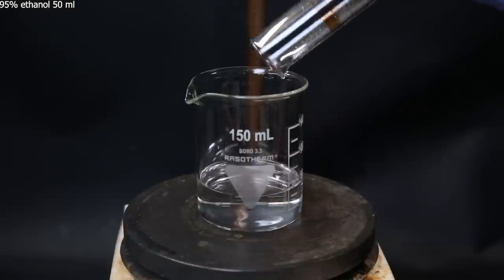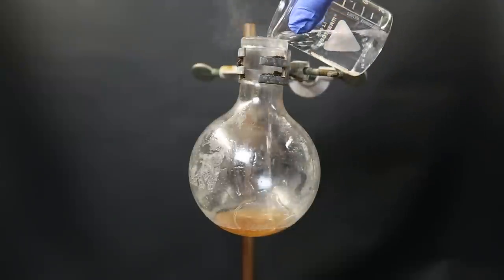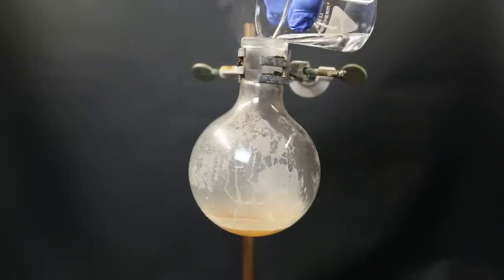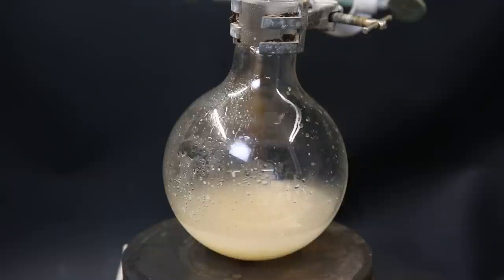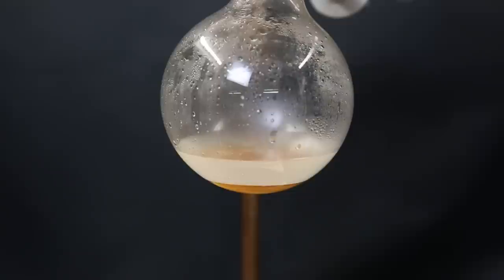I then set up a beaker, and start heating some 95% ethanol. When it is boiling hot, I pour it all into the flask with the residue from the distillation, and then stir it for a bit on the hot plate. This should dissolve part of the triphenyl arsine. I then remove it off heat, stopper it, and allow it to cool down.